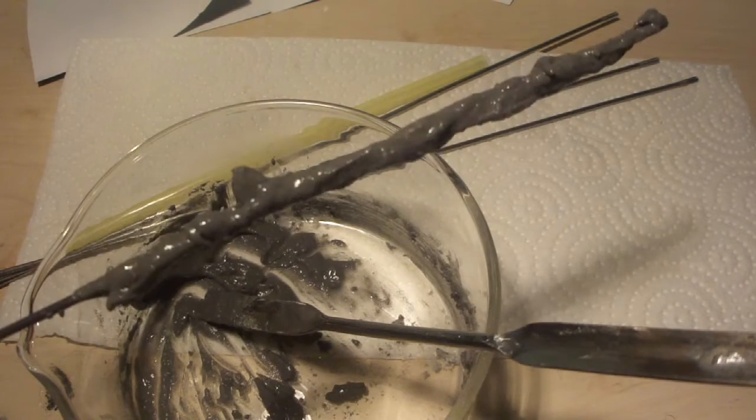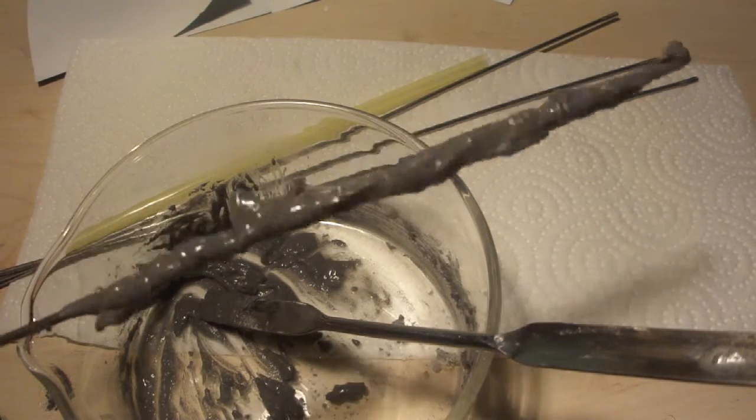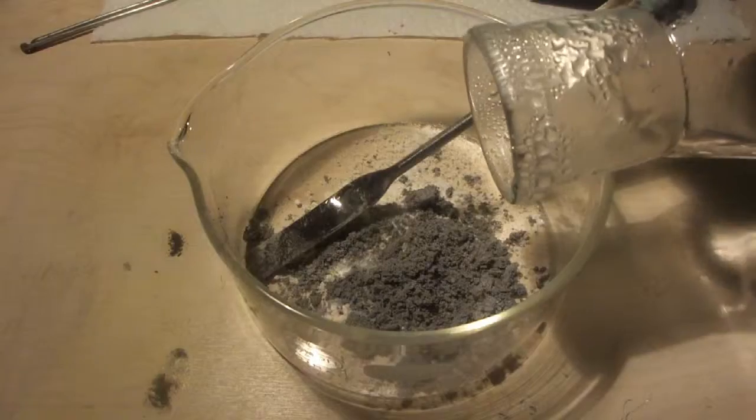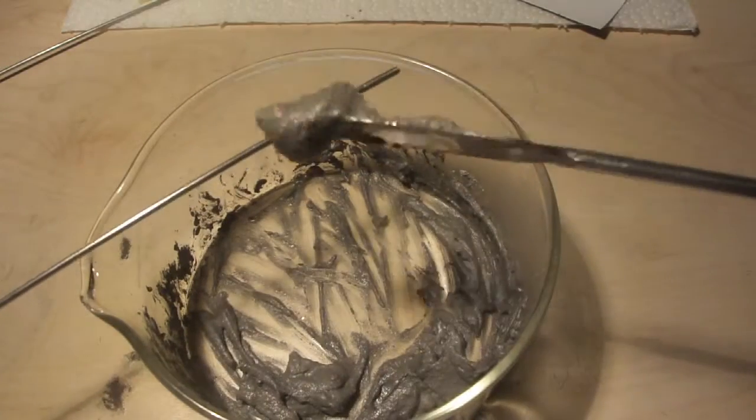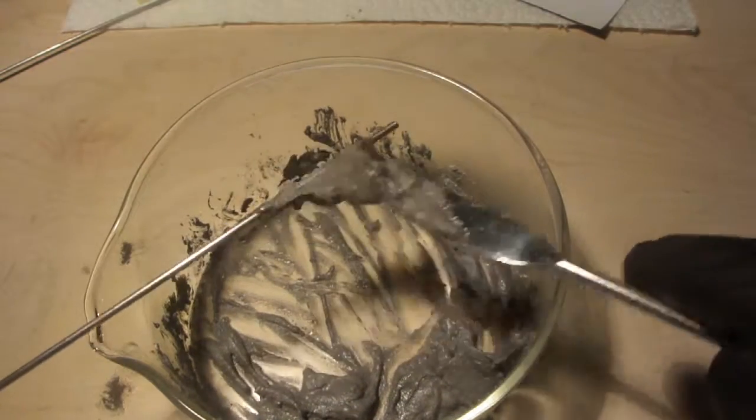That's how one of the finished sparklers looks like. After our batch with the iron powder, we did the exact same thing with magnesium powder. The magnesium powder was treated with stearic acid and hexane as well.